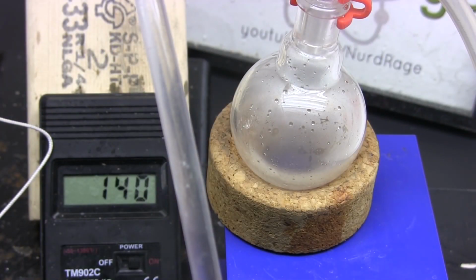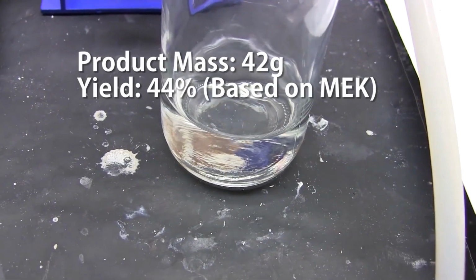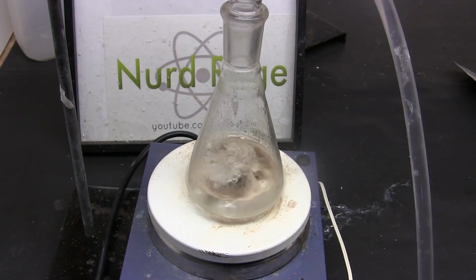Now we get our proper boiling point of around 141 degrees, and there is our purified propionic acid. My final purified yield was 42 grams, or about 44% based on methyl ethyl ketone added. We're going to make ethyl propionate ester by the classic process of Fischer esterification between ethanol and propionic acid.